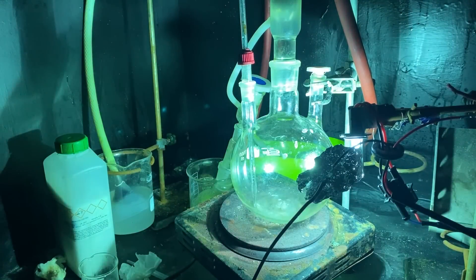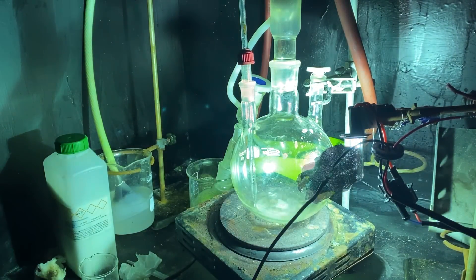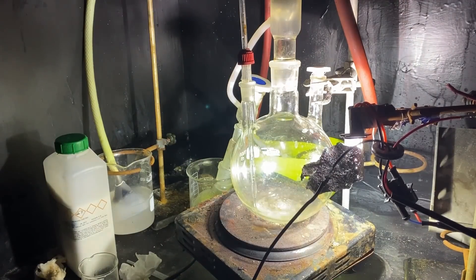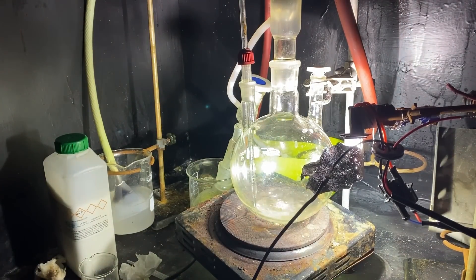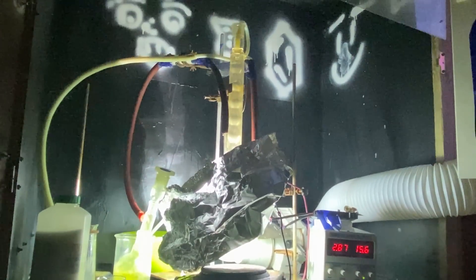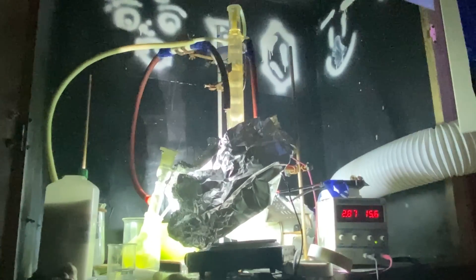You can see how it tested this, especially when I turn off my studio light. It first turns this greenish color but then goes into this almost blinding white. I'm not really good at electronics, so I can't really tell you why that is happening.